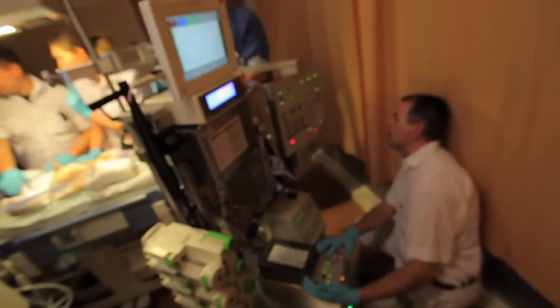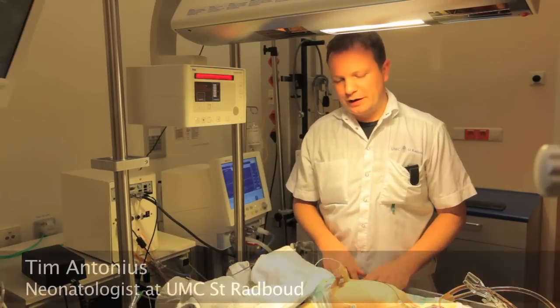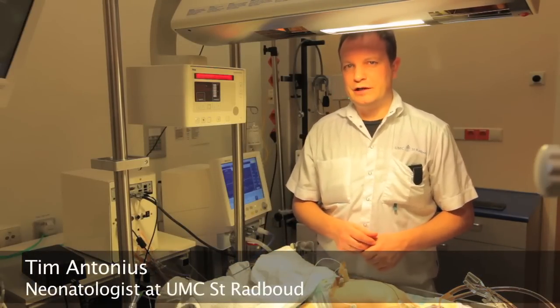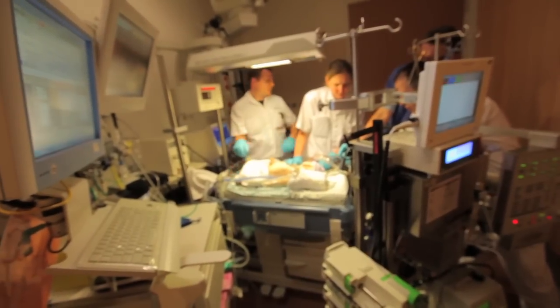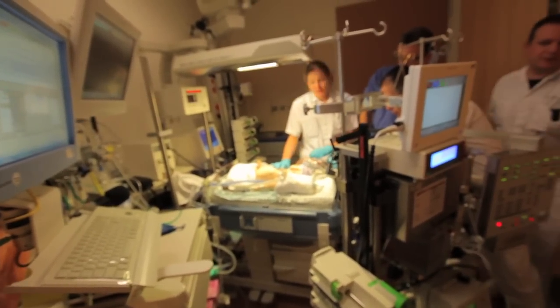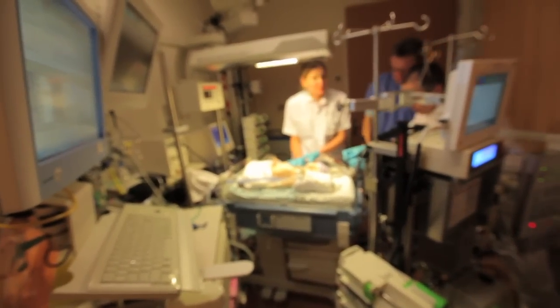It's performed in a clinical realistic simulation setting. It also allows us to observe integration of not only theoretical knowledge, but also practical skills and non-technical skills, while under real-time pressure and with active participation of candidates. So we needed a simulator to incorporate in our simulation program. At present day, there is no commercially available ECMO simulator which suits our needs. And we thought maybe we could develop it in our own facility, and to do that, we had to identify what kind of emergencies we want to simulate.